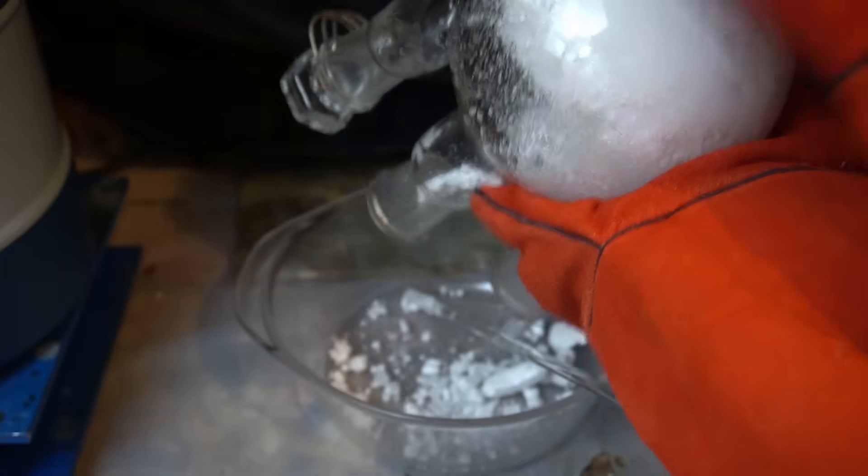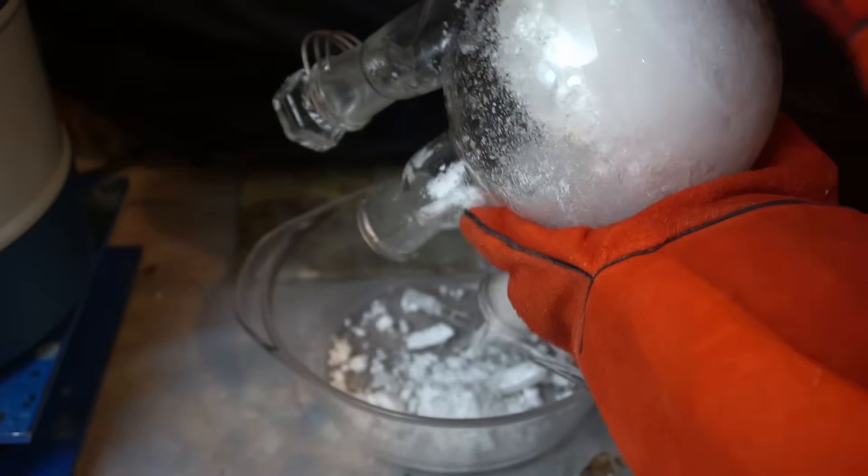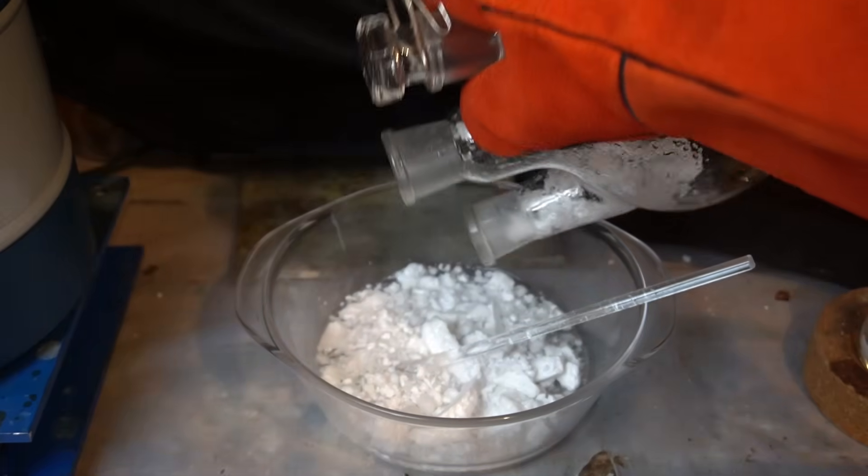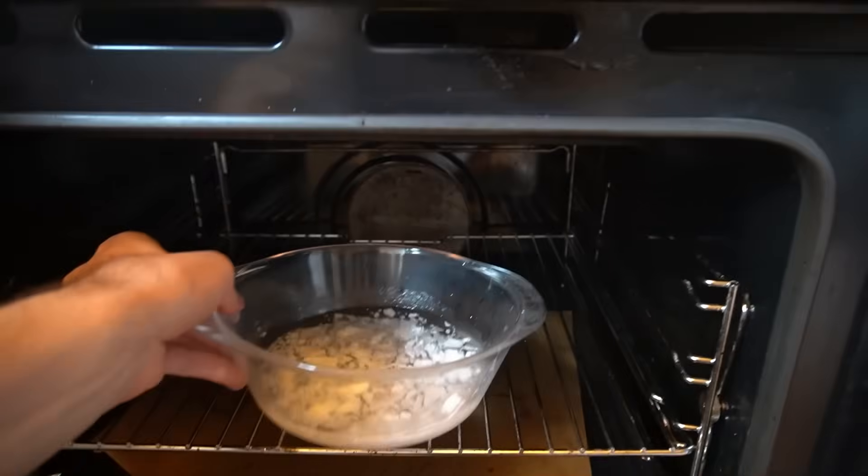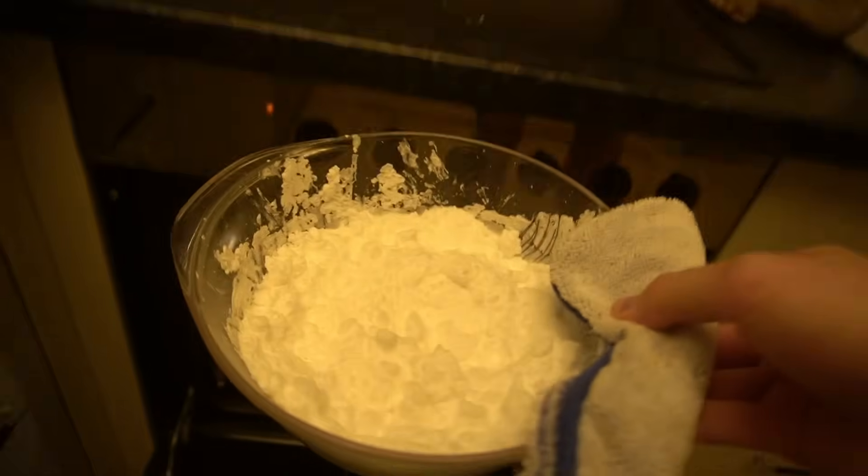So I changed my approach to a much simpler one and scraped all of the sodium acetate into a glass dish and put it in the oven at 150 degrees. I should have just done this from the start, since it works much better, and after about 2 hours, all of the water is gone.